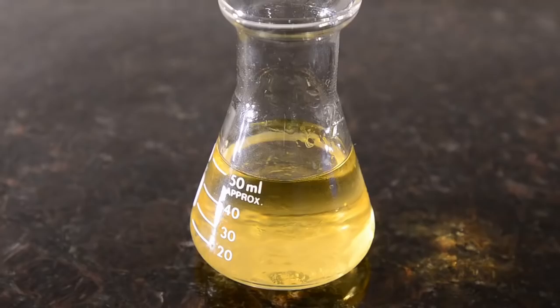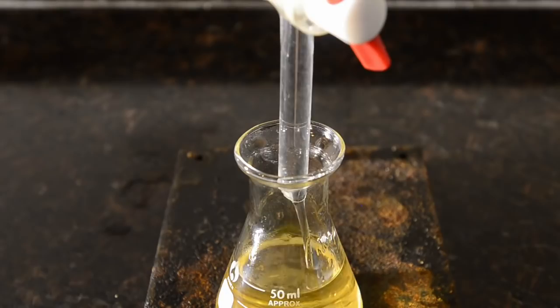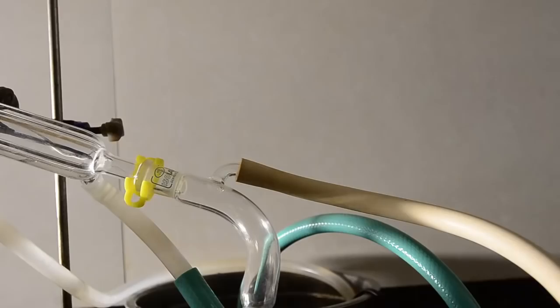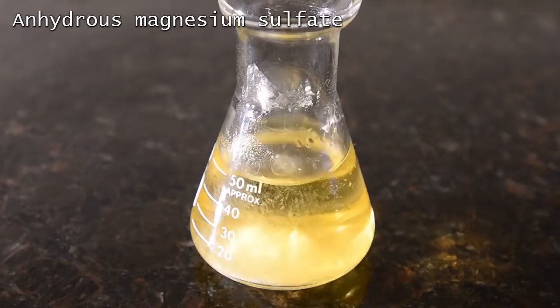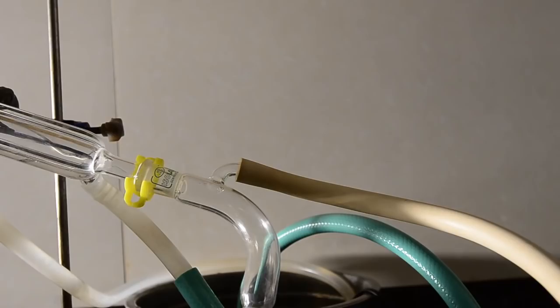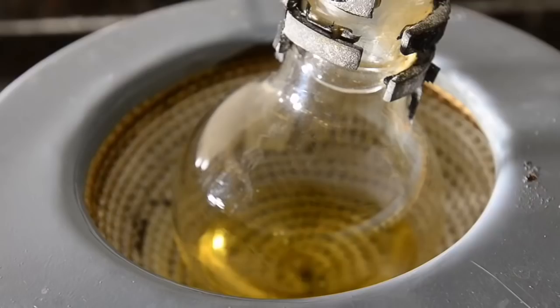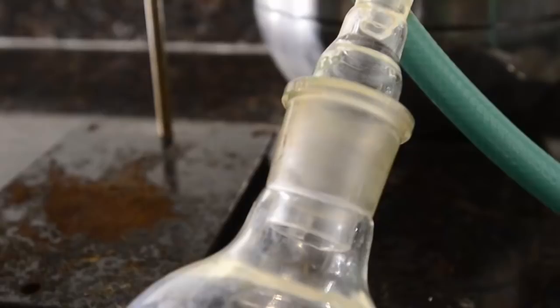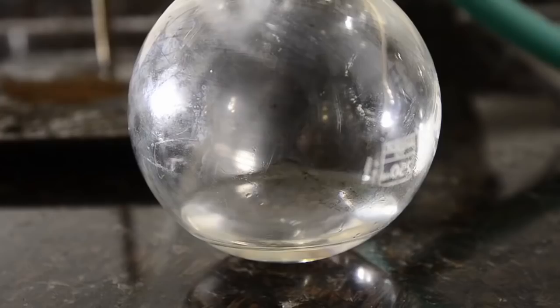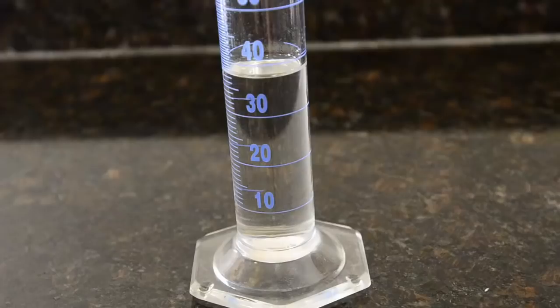Dry using a small amount of anhydrous magnesium sulfate. We then set up for vacuum distillation. The benzene came off rapidly and we recovered this. We collected 37 ml of benzene possibly with a little DCM in there.